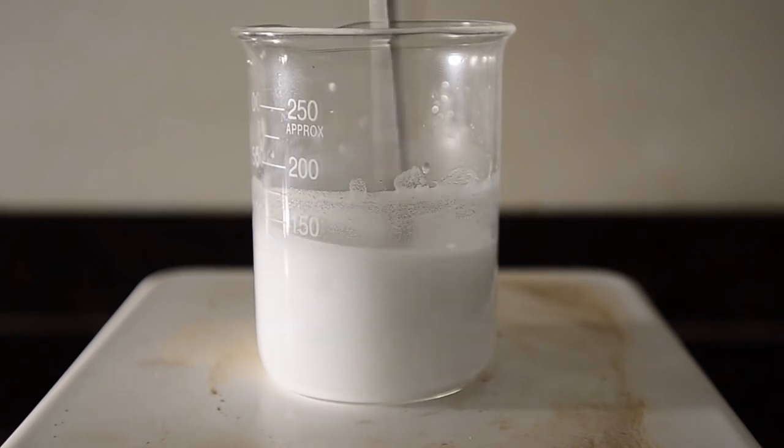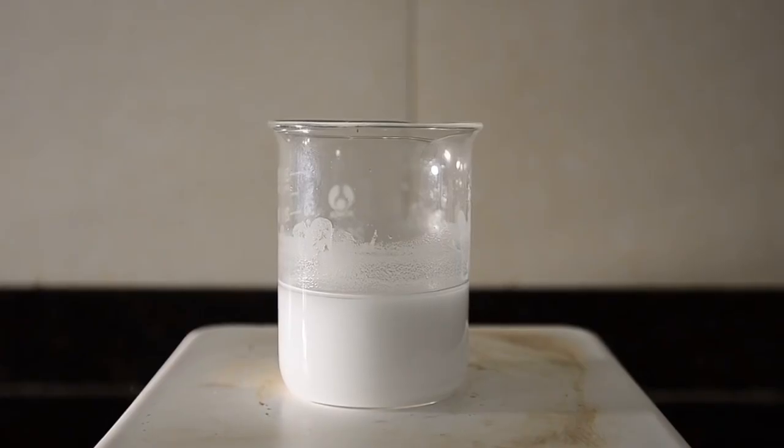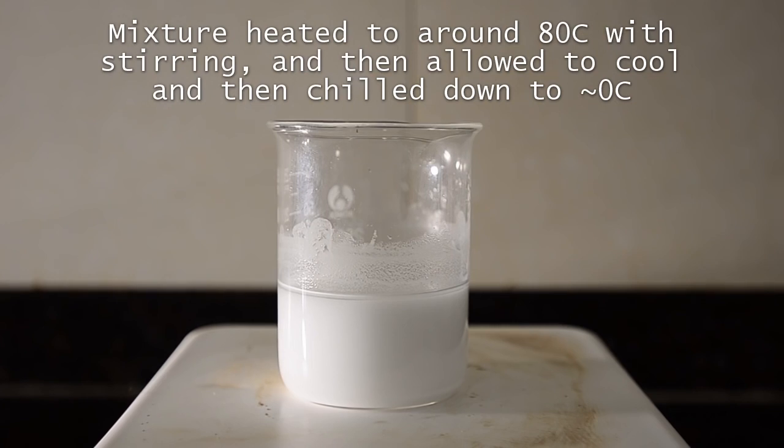You can see that the white crystalline deposit is quite thick and different to the original salt. We stirred the mixture for a few minutes and heated up to around 80 degrees C, then allowed it to cool right down to nearly zero degrees in order to precipitate as much of the sodium chloride salt as possible.